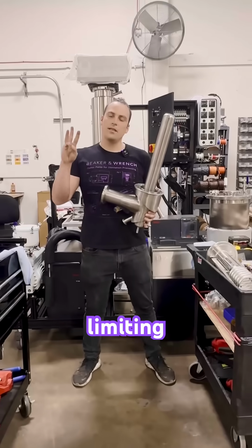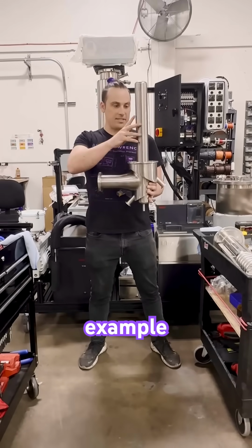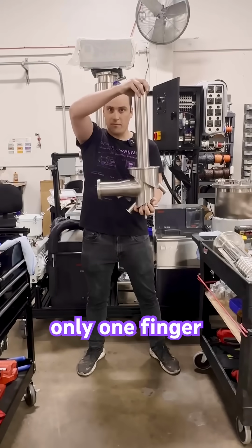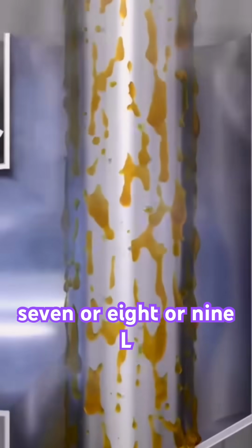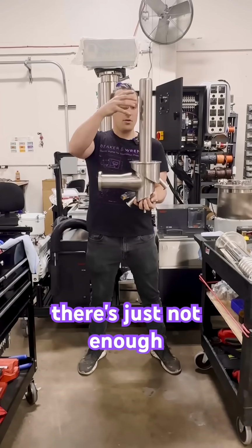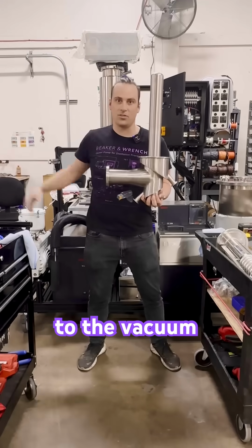environment. There's 3 limiting factors to any condensation system. And this is actually a perfect example of the first one, surface area. This has only 1 finger with a limited amount of surface area. If you start trying to condense more than about 7 or 8 or 9 liters an hour on this condensing surface, there's just not enough time in contact and vapors will go past it and just start exiting to the vacuum system.